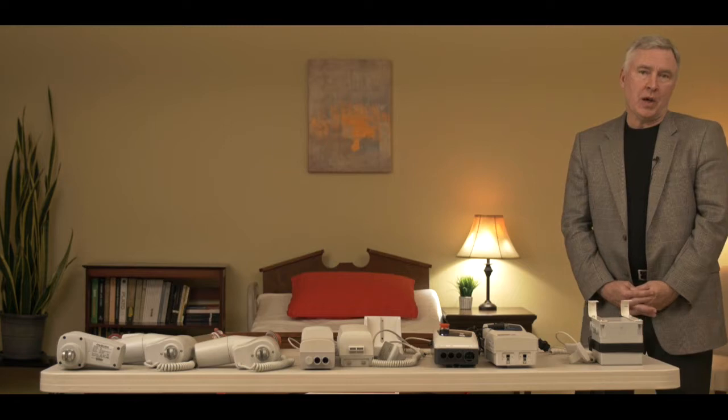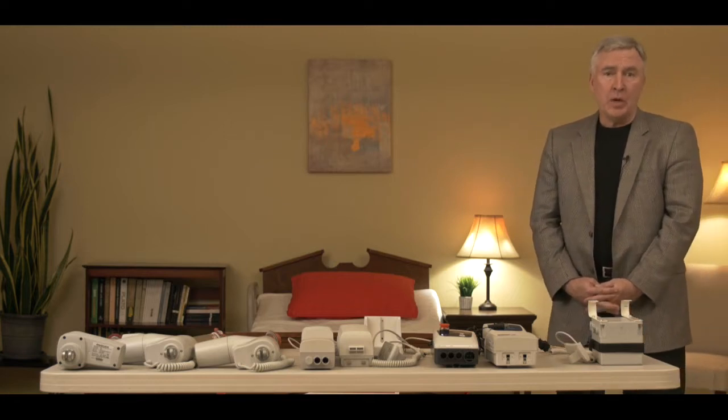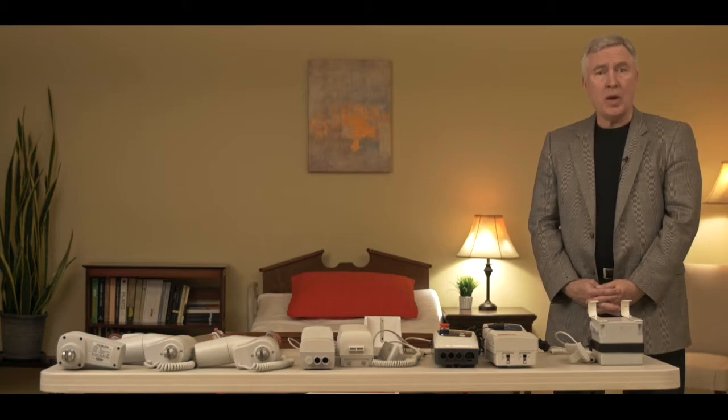Hey folks, this is Damian with Best Care. The purpose of this video is to help you identify what type of Best Care electronics you have on your patient lift, as well as to identify what type of actuator you have on your patient lift.